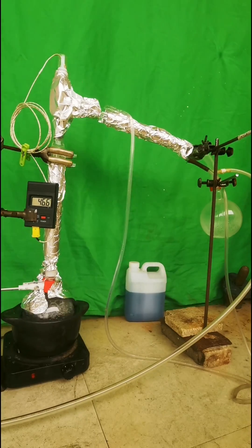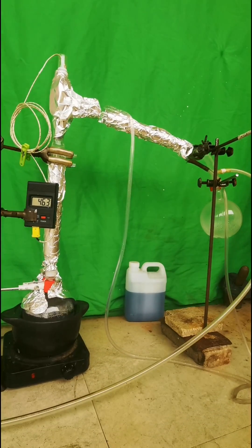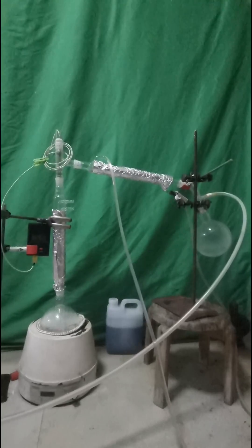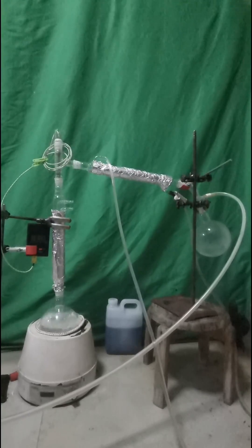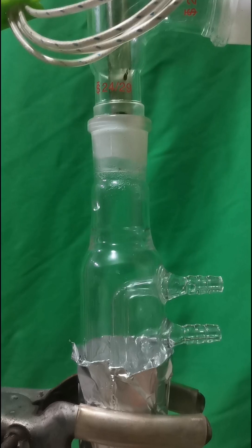About 10 minutes later, water appears in the receiving bottle. It's best to use aluminum foil to block the light. Light can drive hydrogen peroxide to decompose.